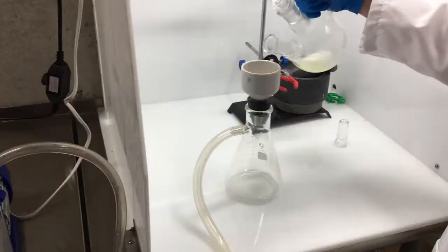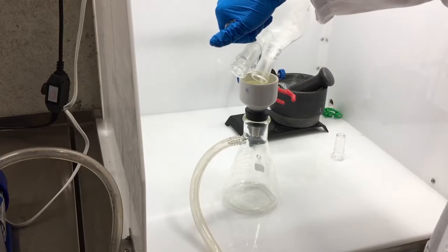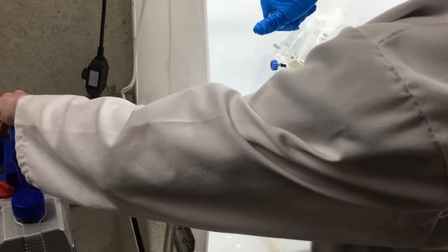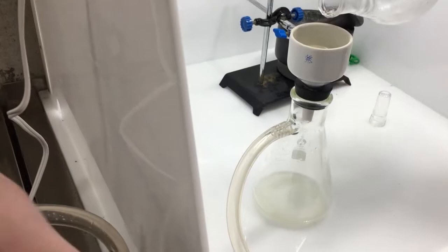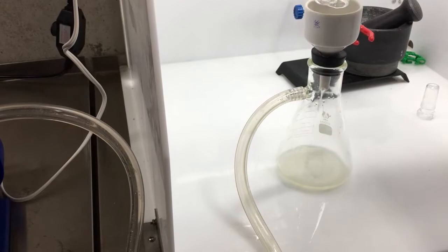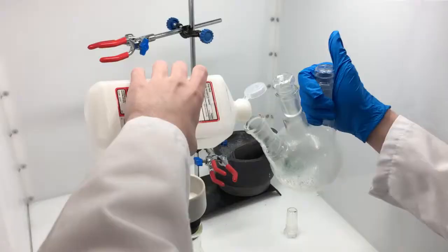Once the sodium azide solution has refluxed for about 20 minutes I let it cool and disassembled it. After it has cooled I put the sodium azide solution into the freezer so that I could get all the sodium azide that I could out of it. And then I later stirred it around so that it would come out into my filter. This did not work very well, it somehow stuck into my flask but that's fine because I'm just going to dissolve it into water and use that to make other azide salts.